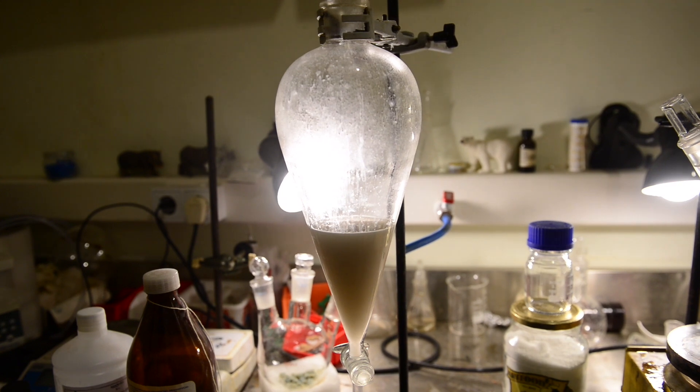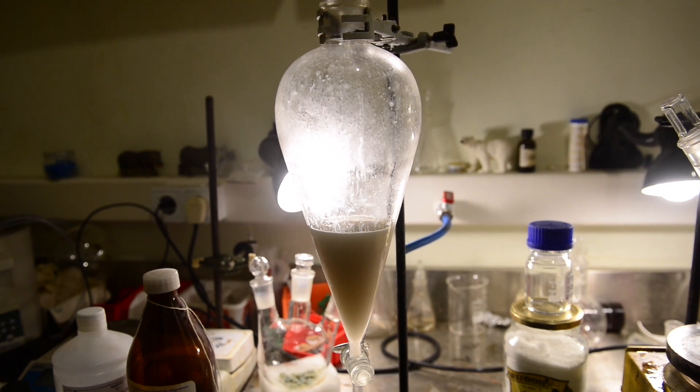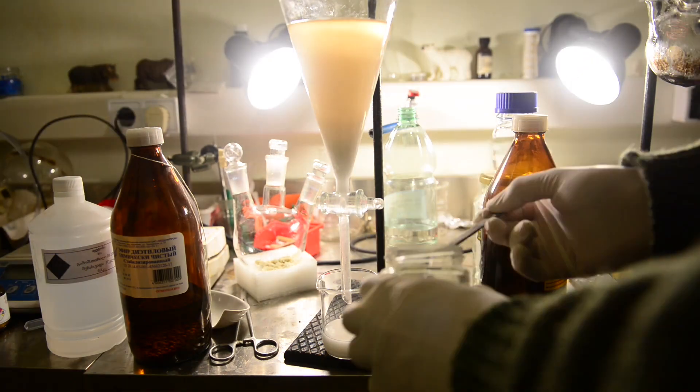After a few hours, emulsion partially separated. We drain the lower phase and add dry magnesium sulfate.